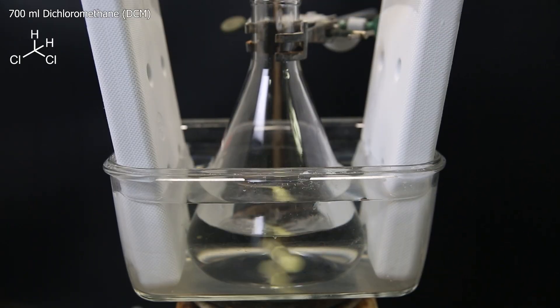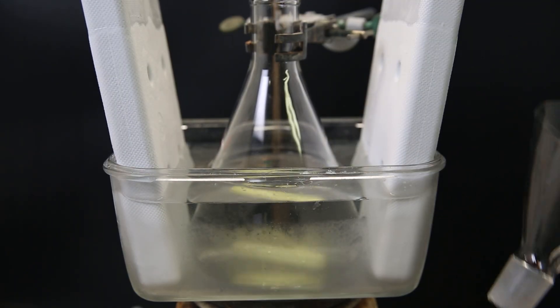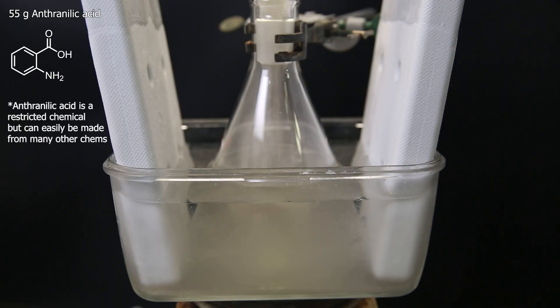Into this, I add 700 mils of the solvent dichloromethane and let it stir for a while until it's cold. When that happens, the first reagent I add is 55 grams of anthranilic acid.